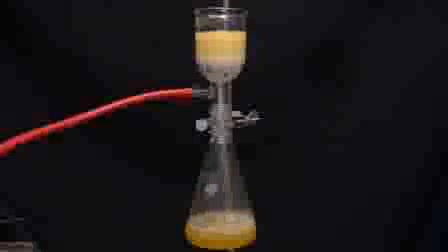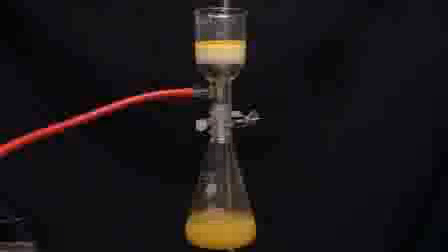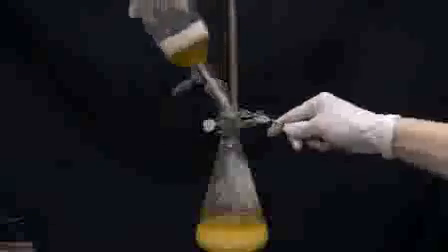I pull a vacuum on the solution and it seems to be working okay, but eventually it gets plugged and nothing will pass. If you look at the bottom, you'll see that some of the methanol is boiling away under the vacuum, and this is exactly the problem. Filtering it under vacuum causes a lot of it to evaporate, and since we're at a near saturation point, crystals start to crash out. The jammed filter was pretty easily fixed by just poking it with a small metal rod. The ammonium chloride crystals in the filter were washed twice with about 50 milliliters of warm methanol.